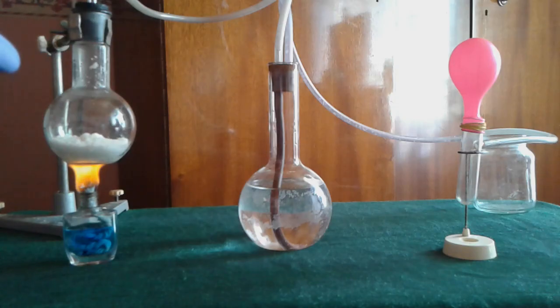Here in this flask I've put a mixture of ammonium chloride and sodium nitrate. When these two chemicals are heated, they react to produce nitrous oxide, sodium chloride known as table salt, and water.